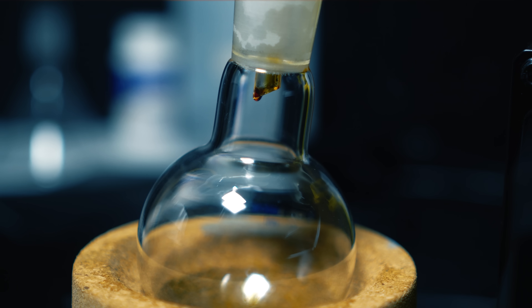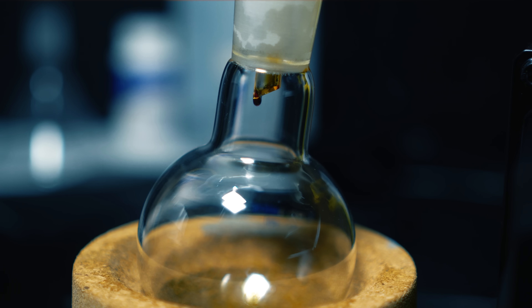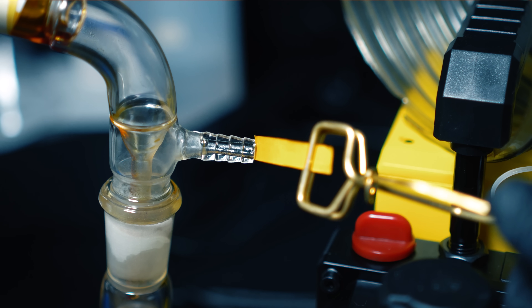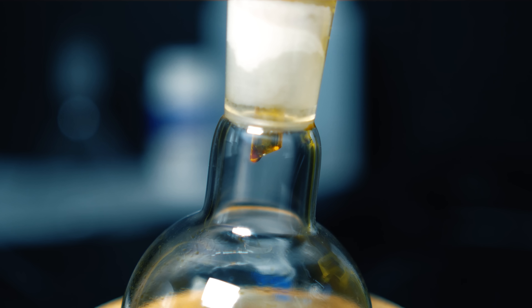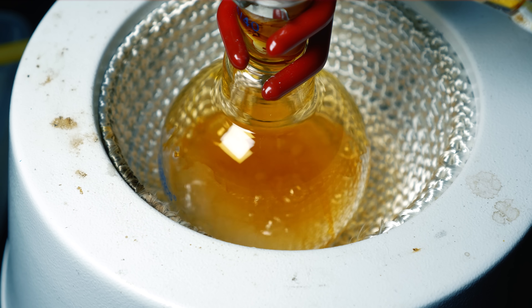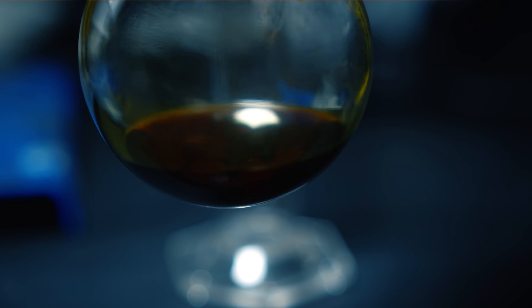The sodium hydroxide trap is really more just in case any cloudy distillate comes over, which is usually from impurities in the phosphoric acid, but it seems like we're good here. Once I knew we were good, I switched the flask out and now we're collecting our hydroiodic acid. Normally you would also attach a hose to the vacuum inlet and have the gas bubbled into water to collect any hydroiodic acid gas fumes, but you really don't get as much back as you think. To show that hydroiodic gas is escaping, the pH paper does indeed change colors — immediately red, showing the pH is quite low. After some time the distillation slowed down, and we can see the color being lost from the original reaction flask, which is a good sign the distillation is coming to an end. The drops are coming very slowly and are quite light, indicating we're almost done. And with that, we have our final yield of hydroiodic acid.